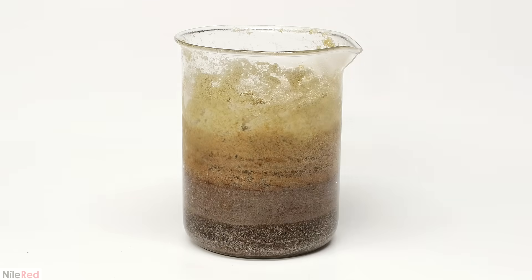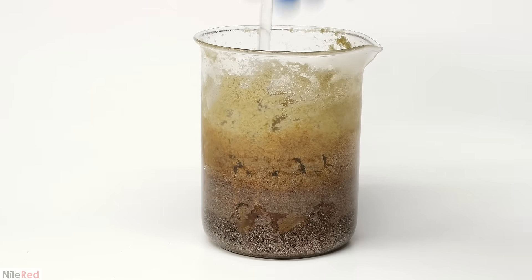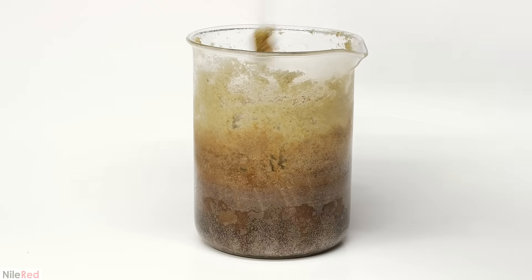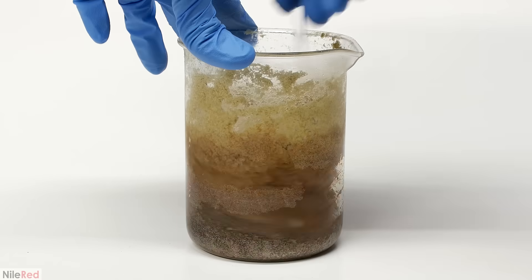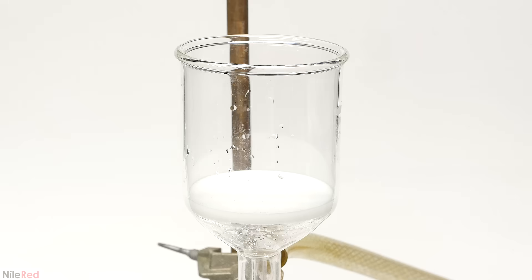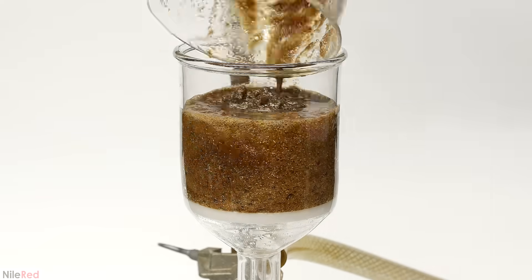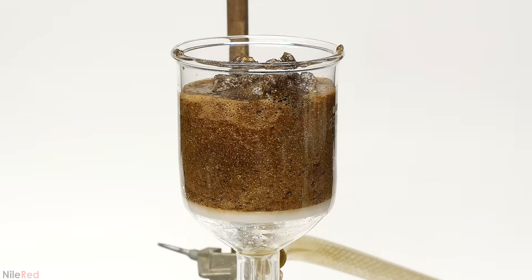A few hours later, I took it out, and the whole mixture had solidified. What I need to do next is filter it, so I quickly break it up using a glass rod. Then, all of the gross brown goo is added to a vacuum filter.